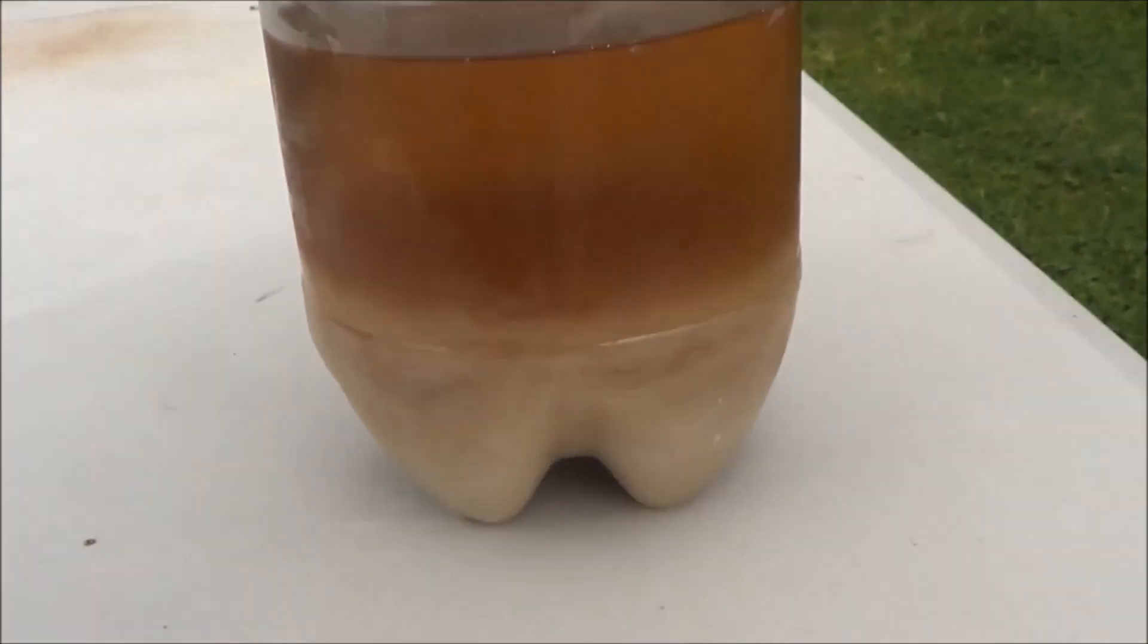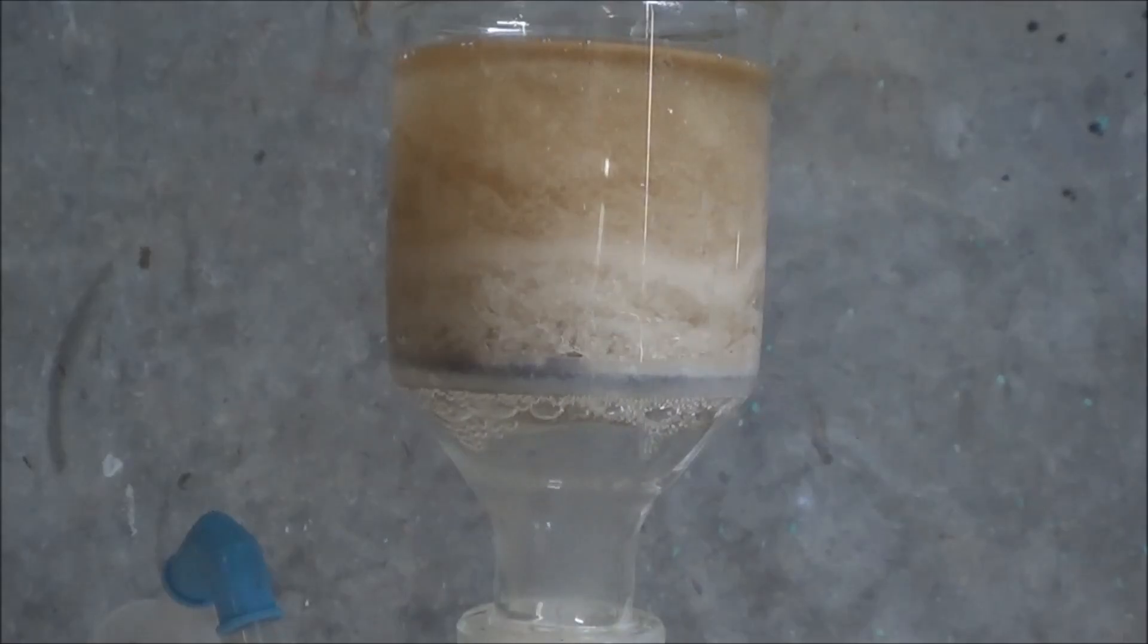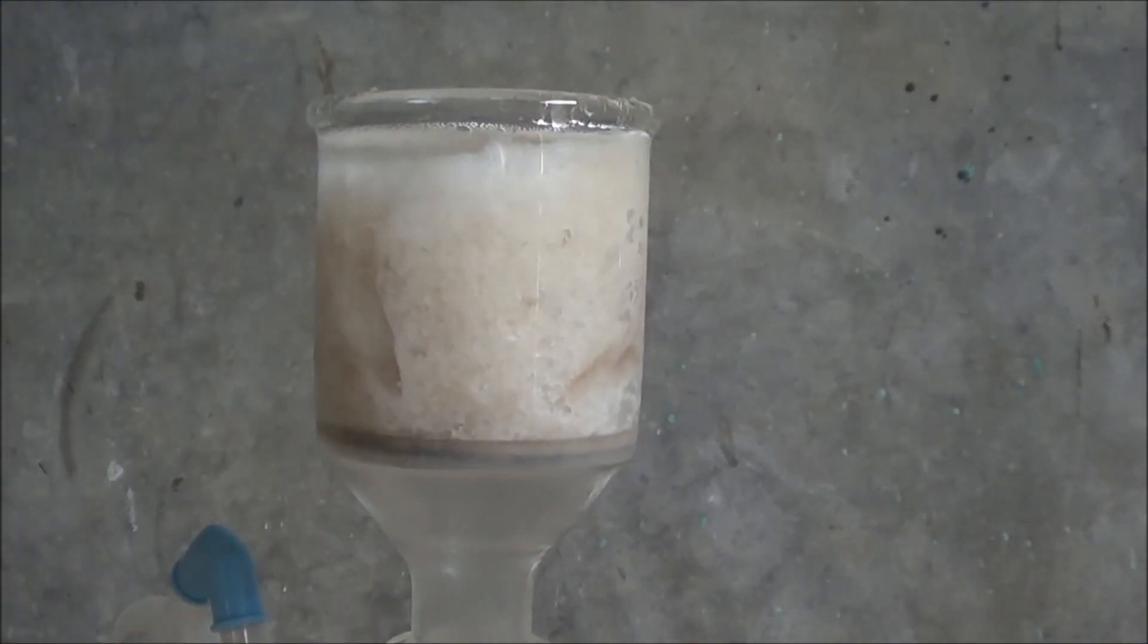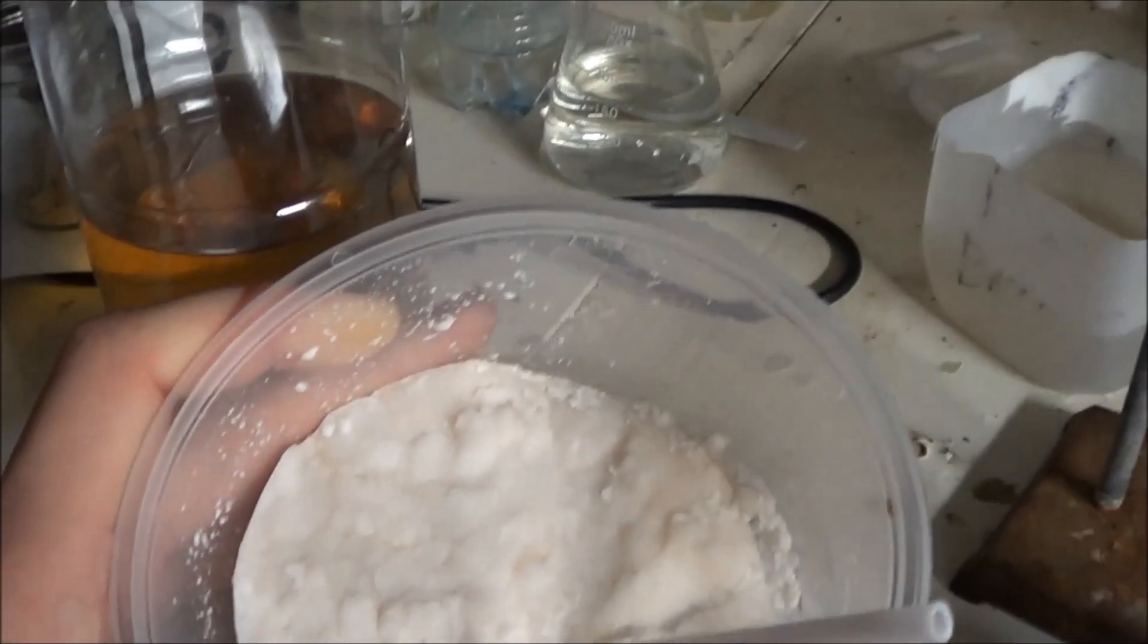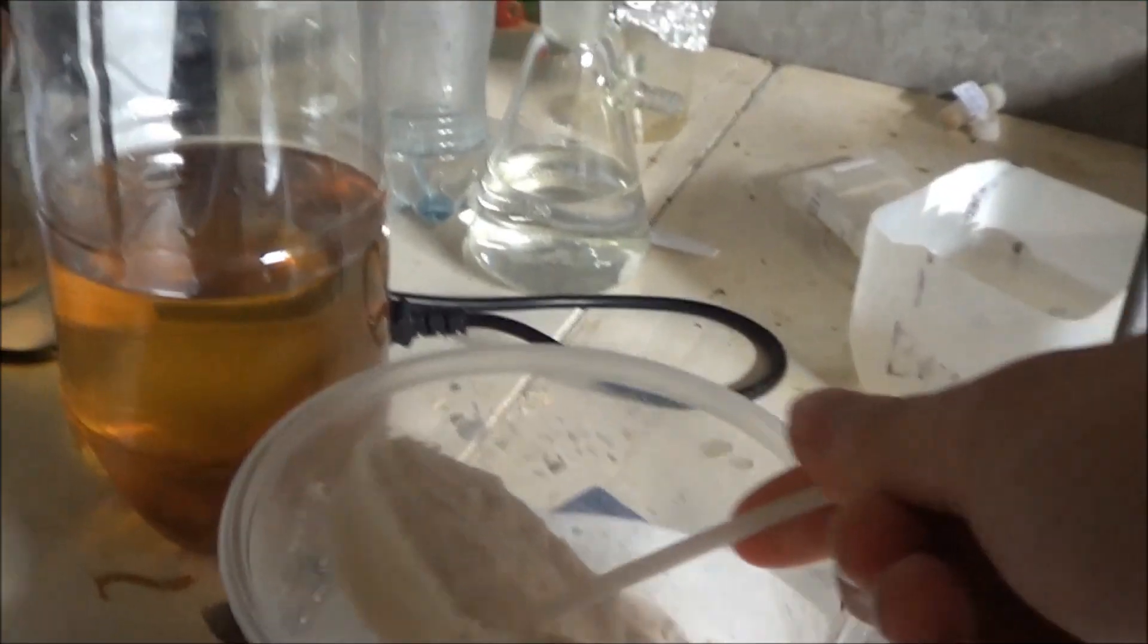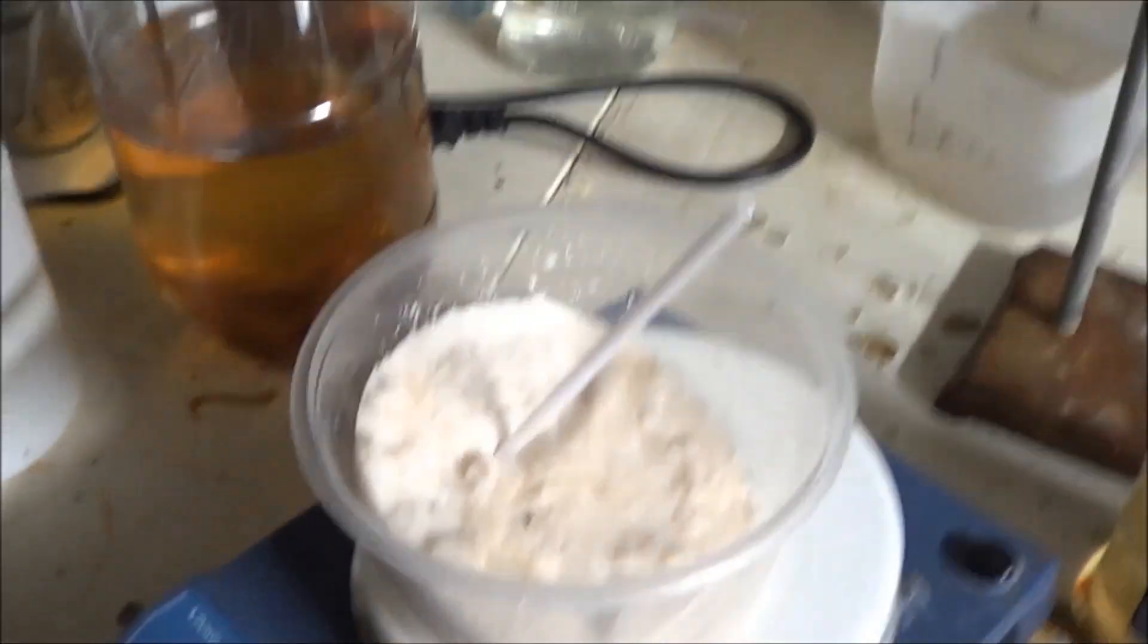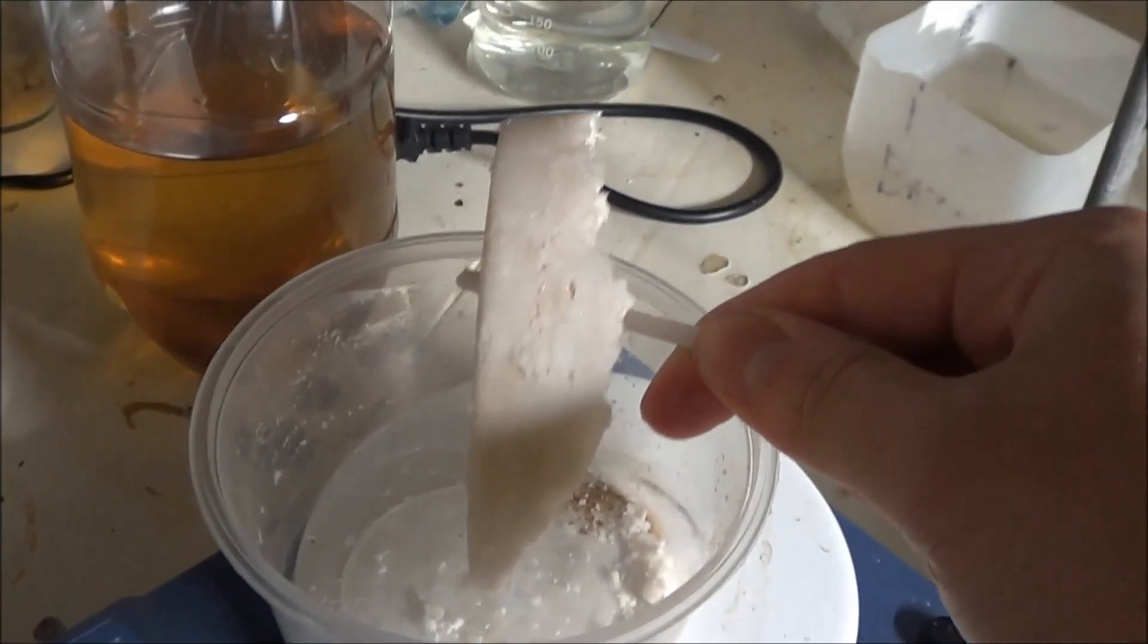This is the day after, so it's been in the fridge overnight. You can see we've got a good crop of crystals in there. Then filter, wash with a little ice-cold water, and dry thoroughly on the pump. So to dry these crystals off, I put them in an oven for a little while, and then left to dry overnight, like I took them out of the oven to dry overnight, otherwise I melt the plastic. That seems to have been a bit of a bad choice, because the oven has made everything else re-dissolve in the small amount of liquid that was remaining, and now it's sort of set into this big block of crystals.